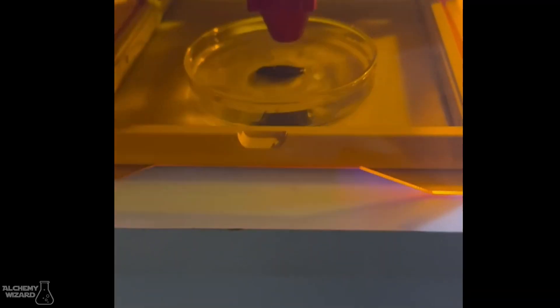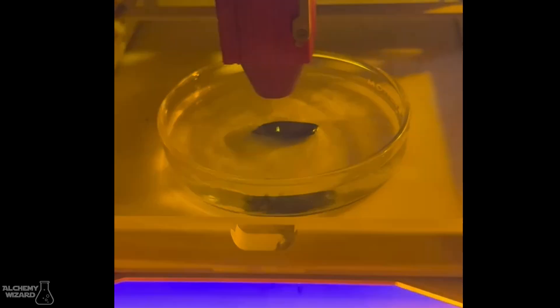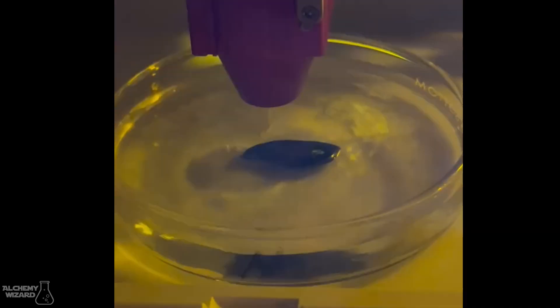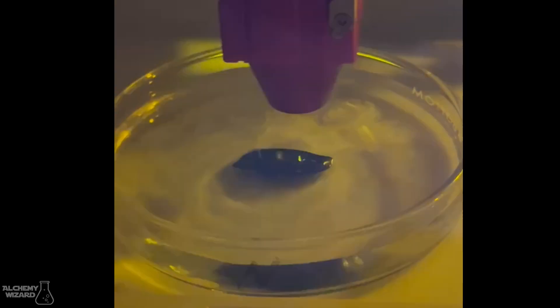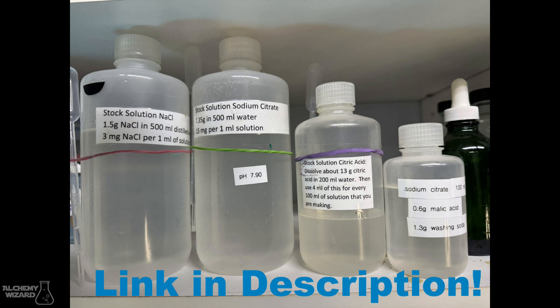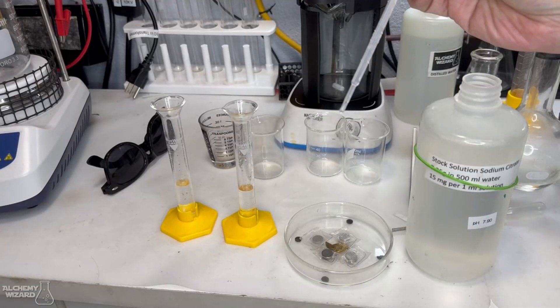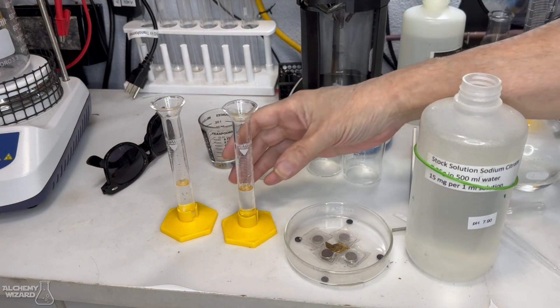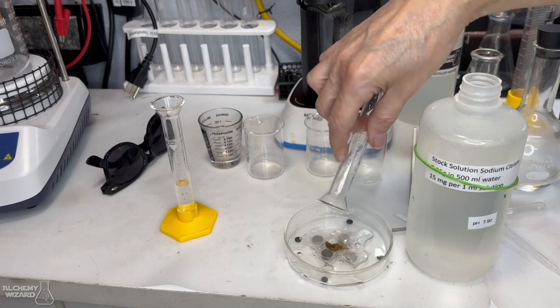First, we need a chaotic environment to create gold nanostars. The laser already presents us with that, so we want to increase that chaotic quality a little higher. We're going to do that by adding things to our 50 milliliters of liquid in the Petri dish. First, we'll add five drops of sodium citrate from my stock solution — you can look that up in the video archive. That's going to prevent the nanoparticles from aggregating, and a small amount of sodium citrate is still absolutely fine for drinking.